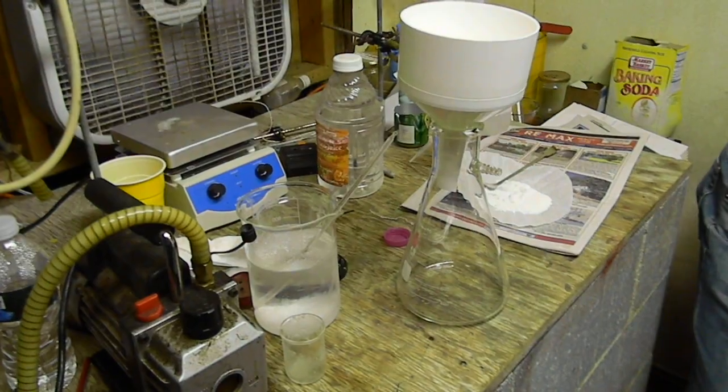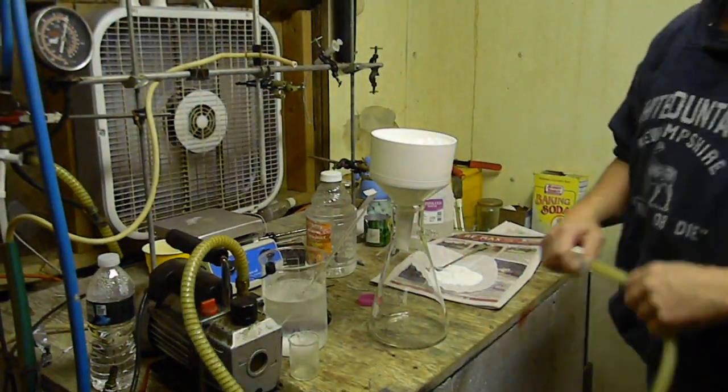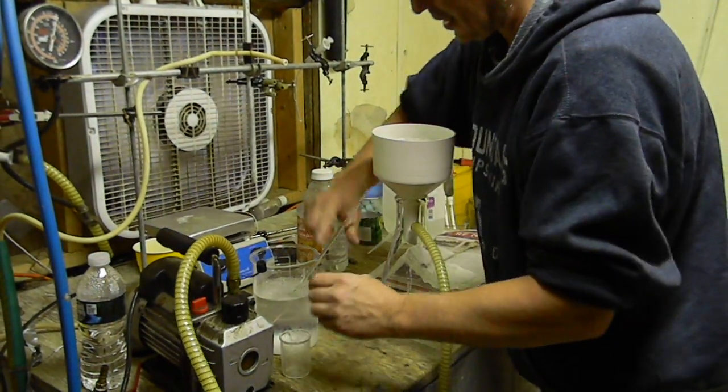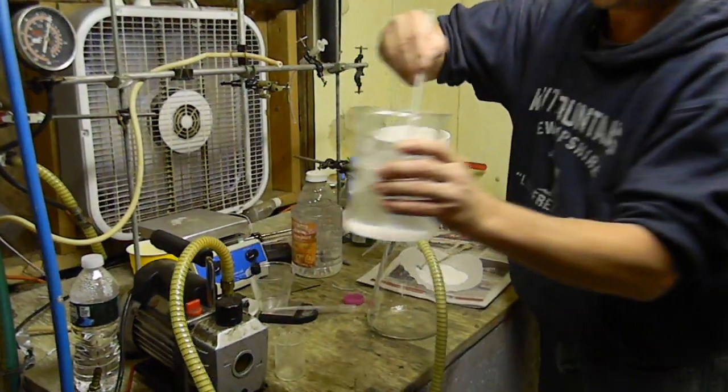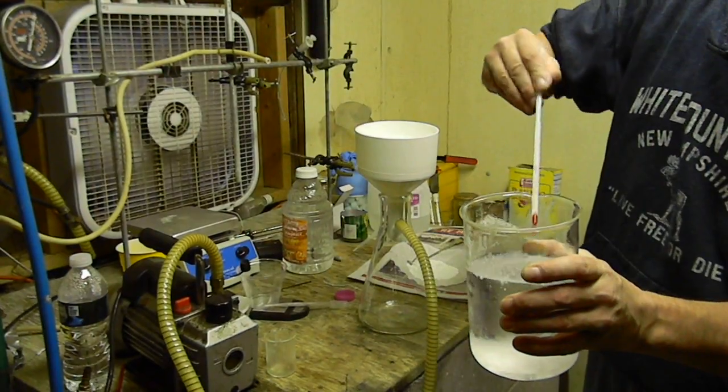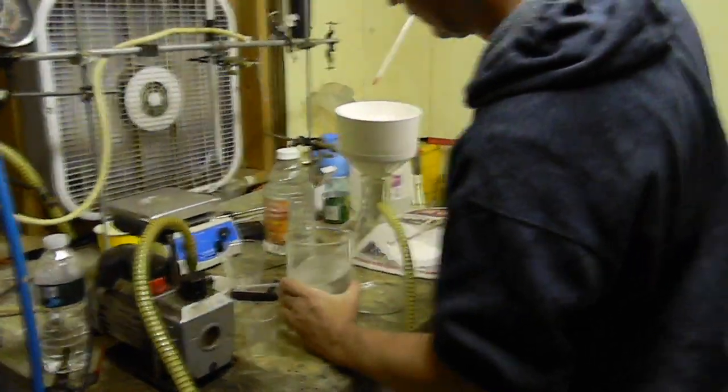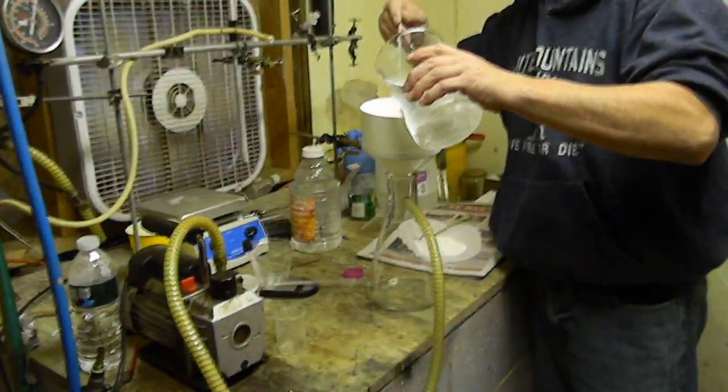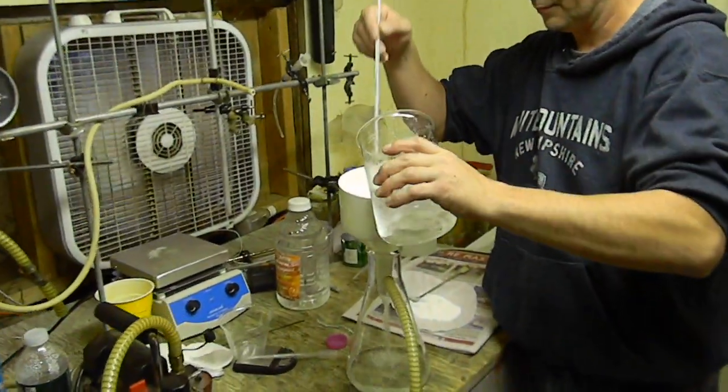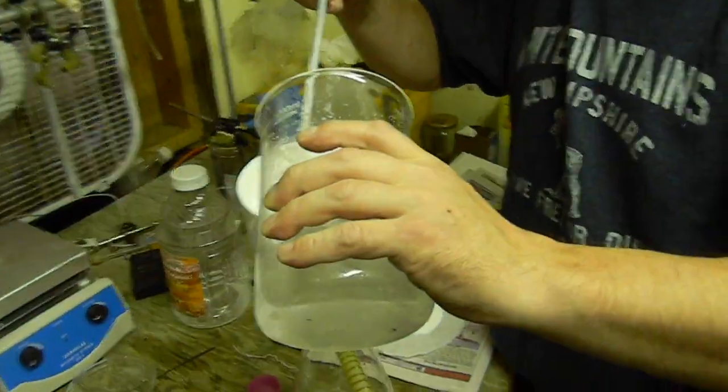Hopefully the battery doesn't die in this thing while I'm doing it. It generally will die with no warning. So, we got that. And I want to get this stuff off the thermometer which is, like I said, it gets crunchy and hard.